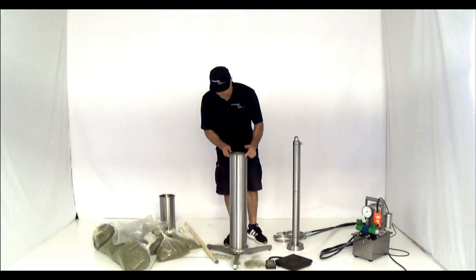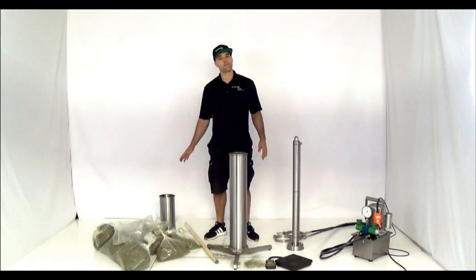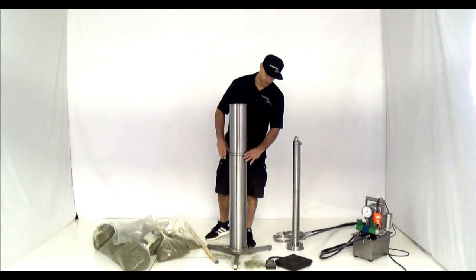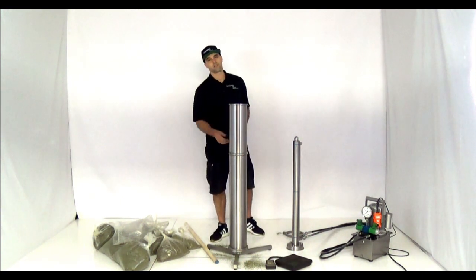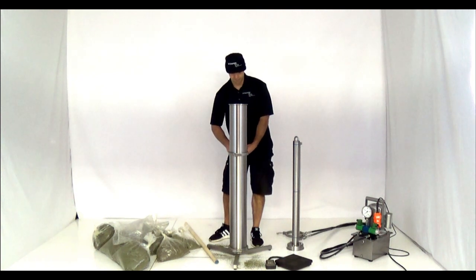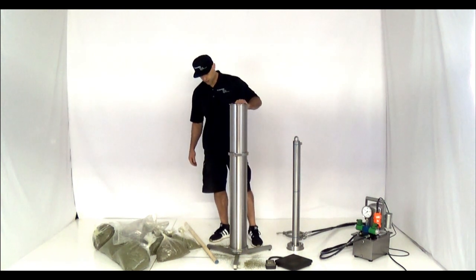So now this would be what you would normally have. With our Iron Fist system we recommend about 50% more material. This is what we call a hopper column — it's basically just your column length, same diameter, but it's your length divided by 2. So this is a 16 inch by 6 inch column. We're going to use a hinged clamp on this one just because they're nice and fast. I'm going to tighten it down — it's usually just about finger tight and holds it on there real good.